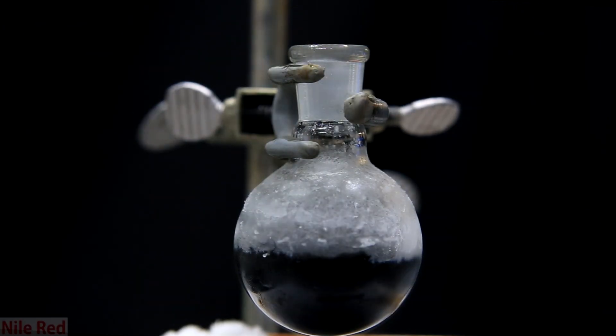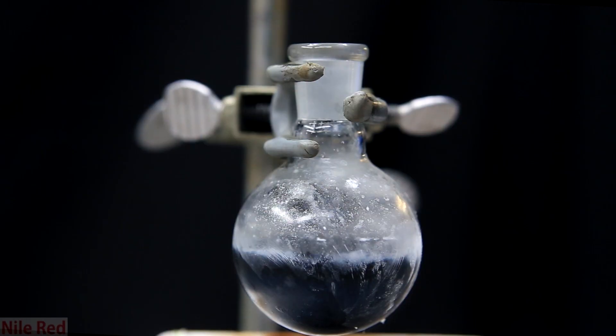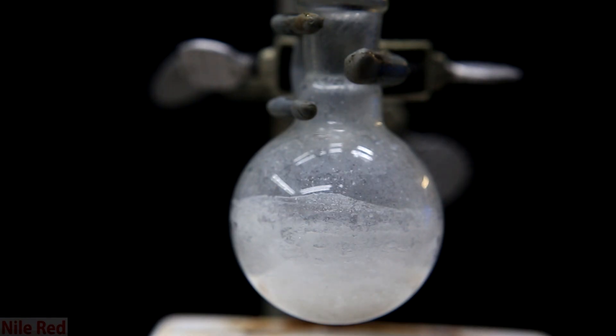After an hour it's removed from the cold bath and the stopper is removed. I leave it like this stirring at room temperature until all of the liquid ammonia evaporates. When I come back after a few hours I'm left with a flask coated with a white solid.